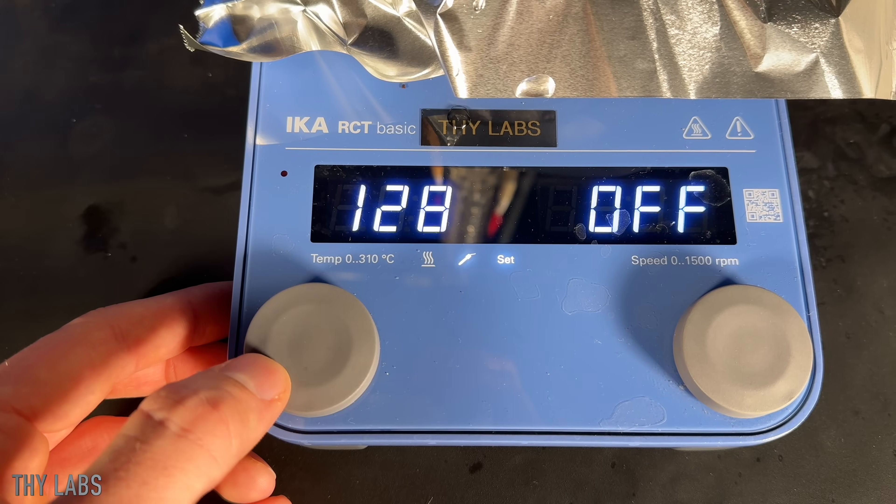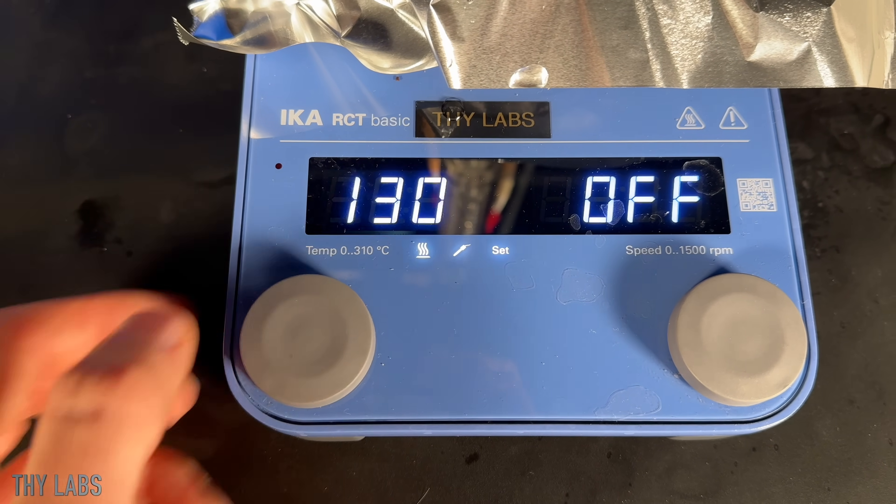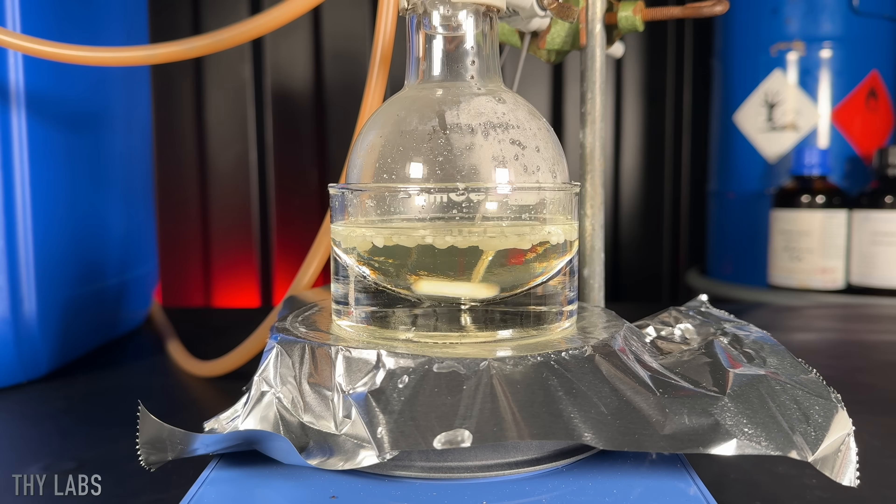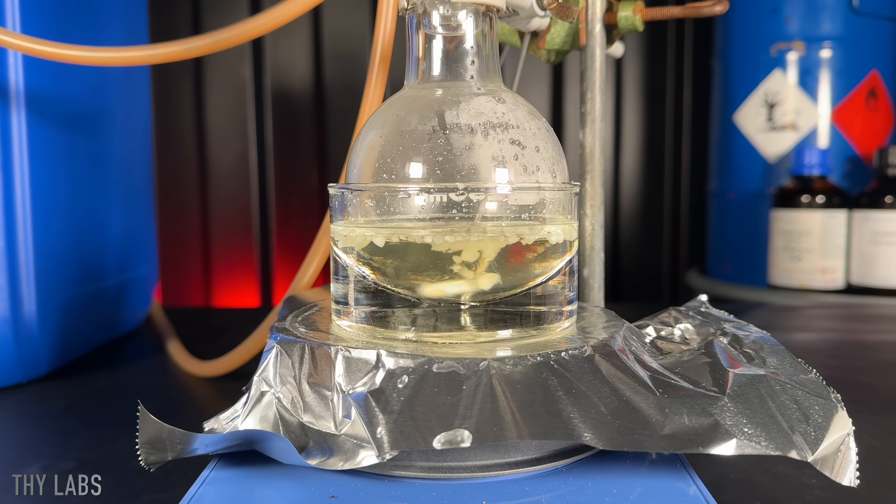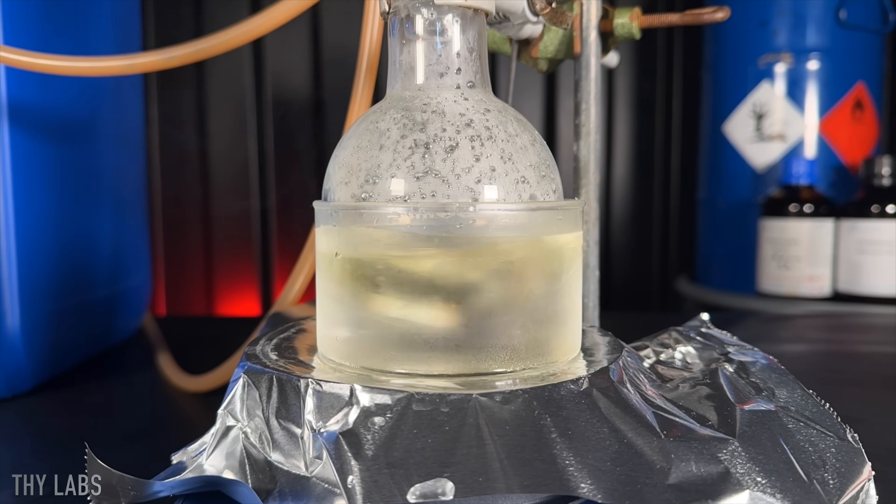To keep the vapors from escaping, I set up a reflux condenser. I am going to aim for letting the reaction run for 16 hours, but longer or shorter doesn't really matter.